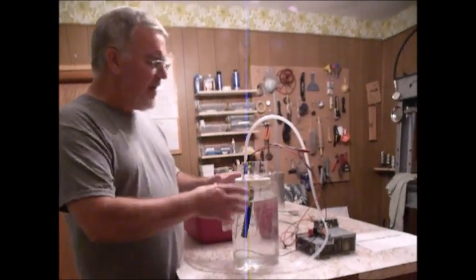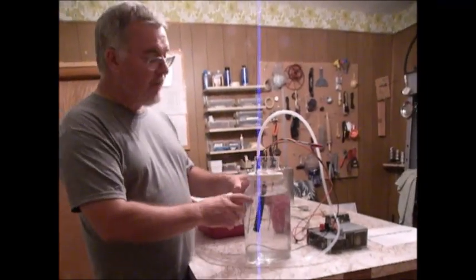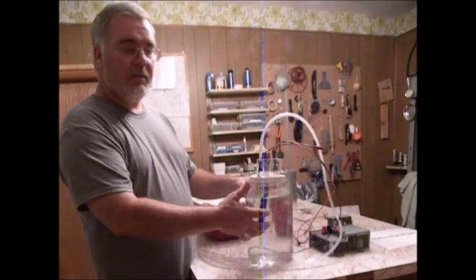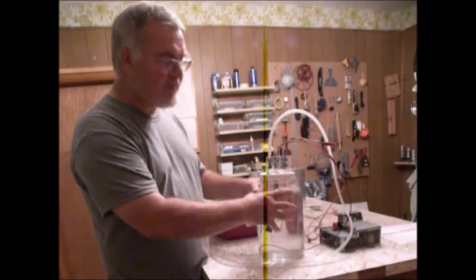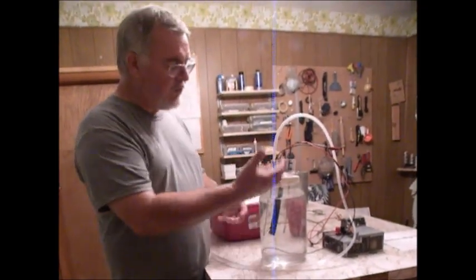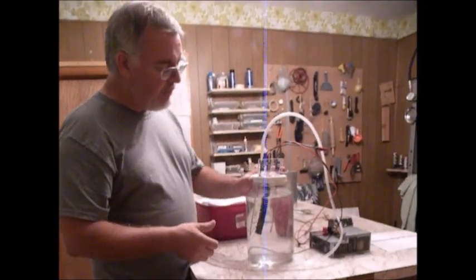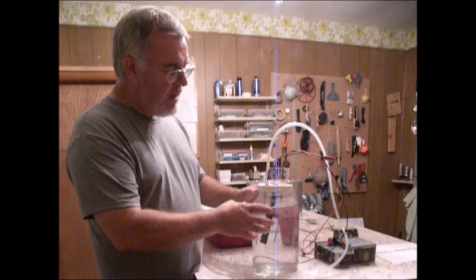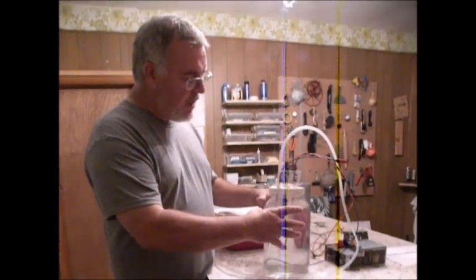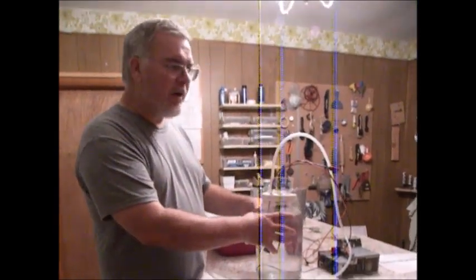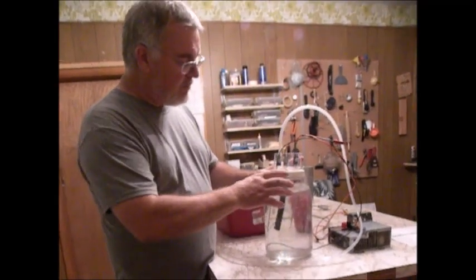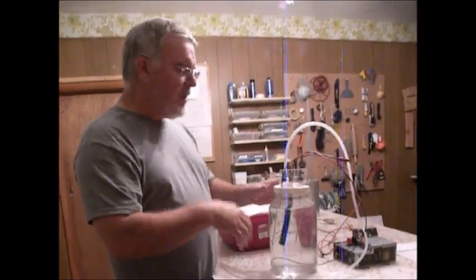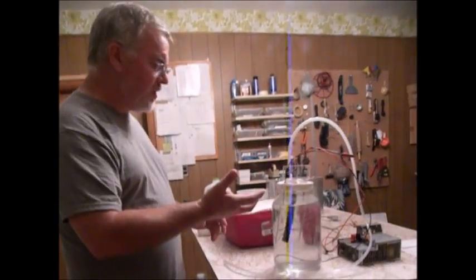When I was running the two-day cycle, I was actually running three jars. I always had three concentrations. I had one I would take off, I would let it cool down so we could harvest the chlorate out of it. I had another one that was ready to put back on, and then I had one that I was recharging. If you're running three or four days, you could probably get by with two.